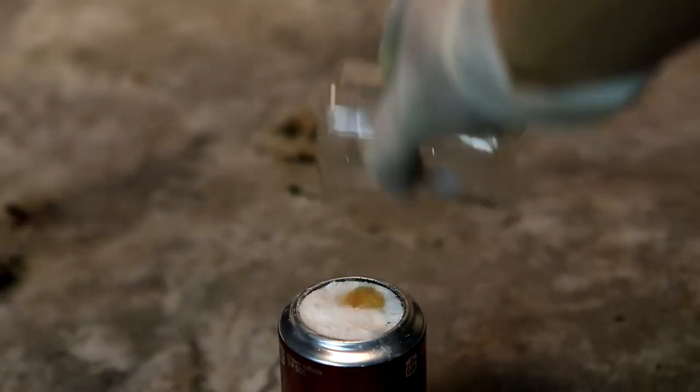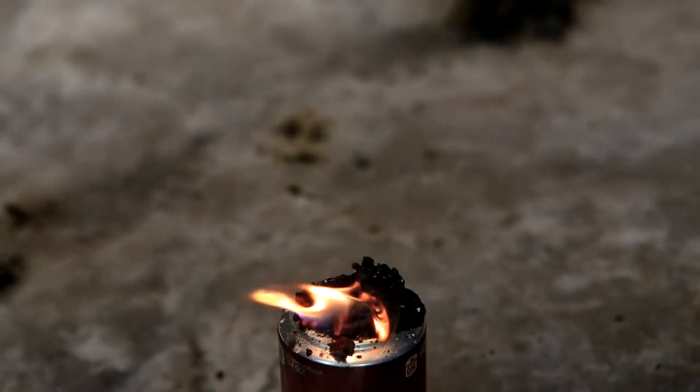It was then tested by igniting an equal portion of potassium chlorate and sugar using concentrated sulfuric acid.